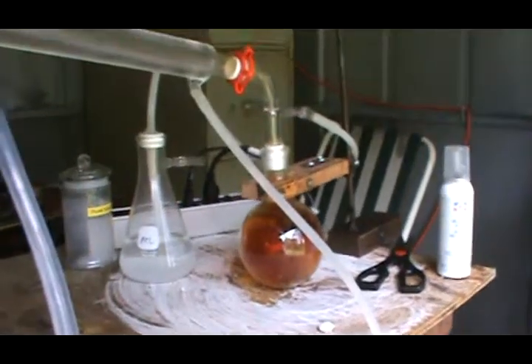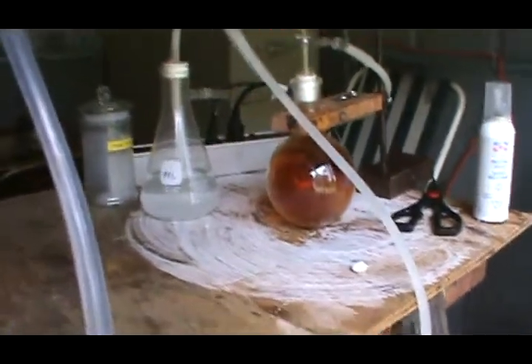In a little bit I'll show you some nitric acid that's going to be in there. You can see some steady drips of nitric acid coming.